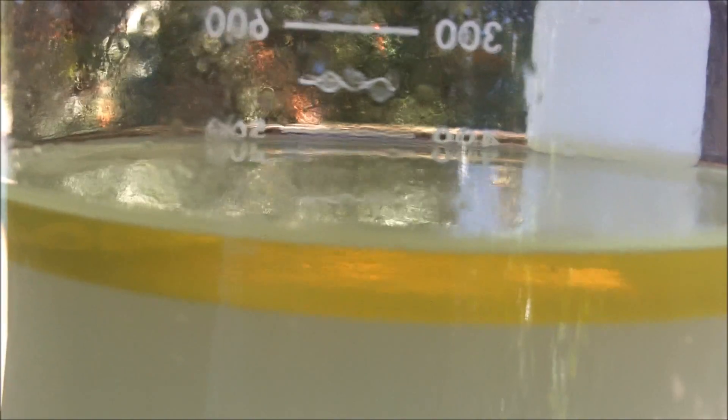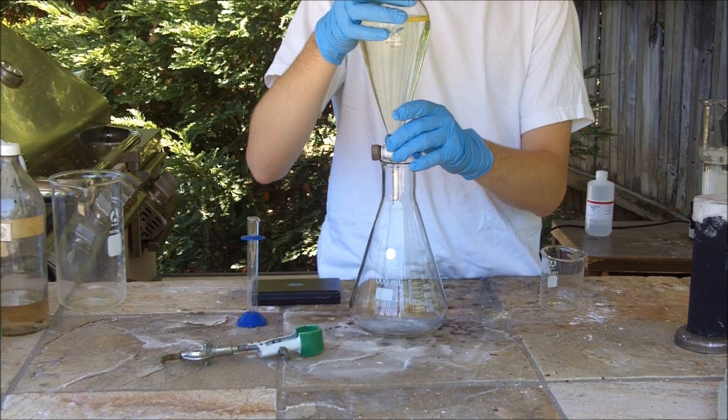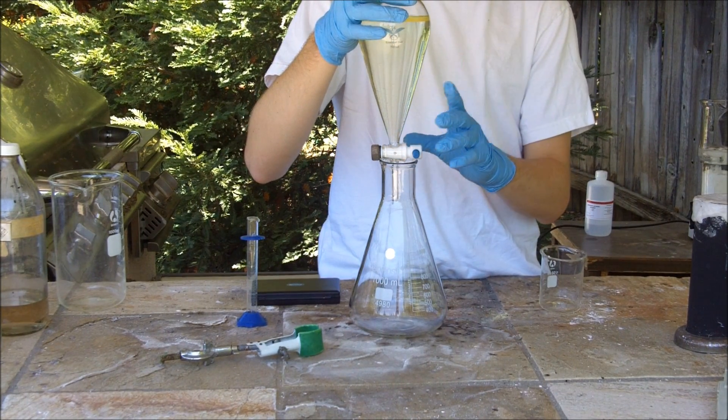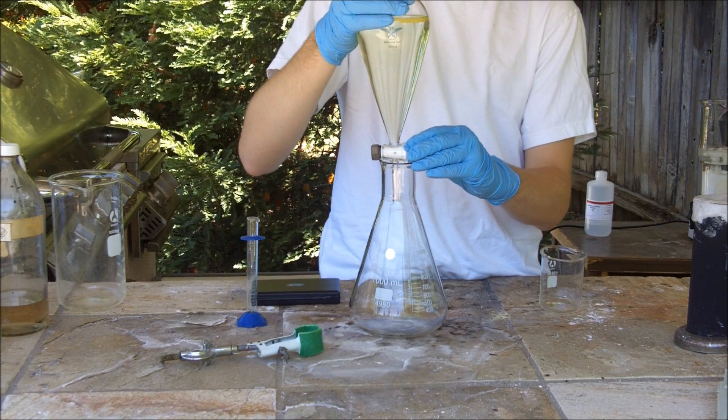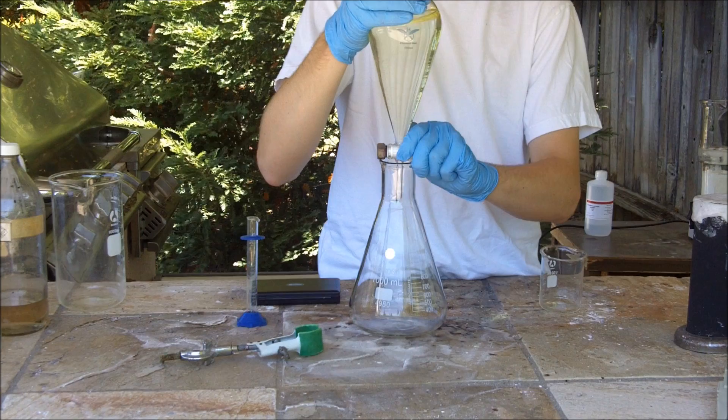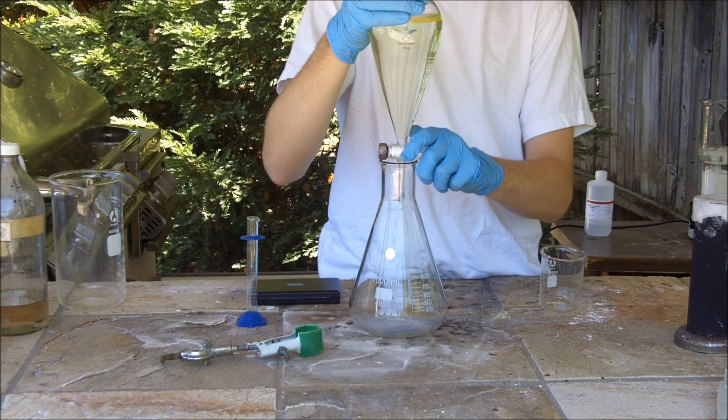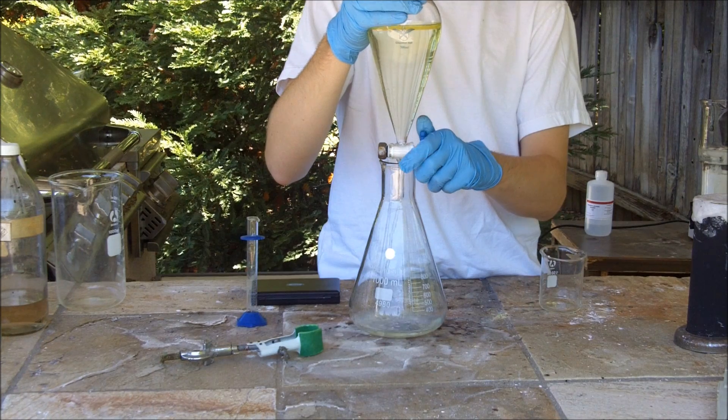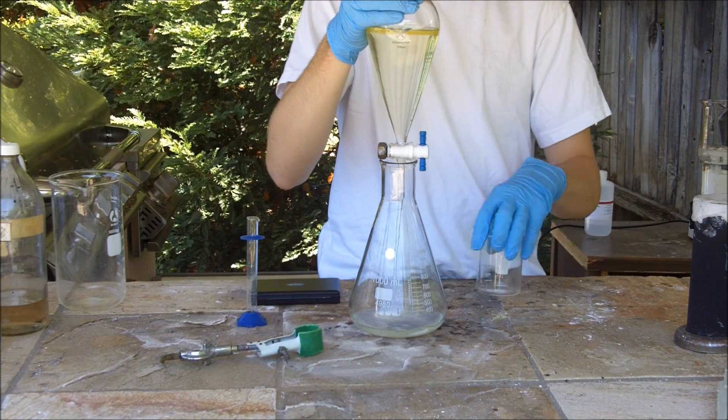Better look at it. Okay, now since I have finished the reaction, I let it sit for a while to separate into two layers and then pour it into sep funnel. So we want the top layer, so I am discarding the bottom layer into this flask right now. And I will pull the top layer off and put it into this beaker.